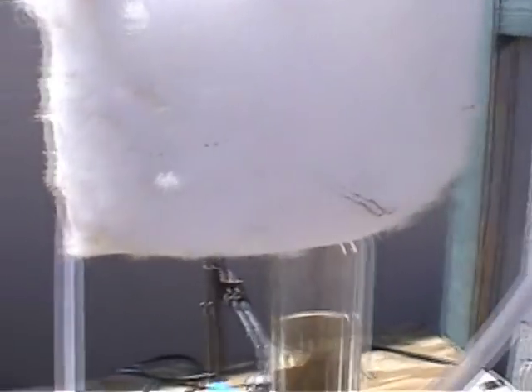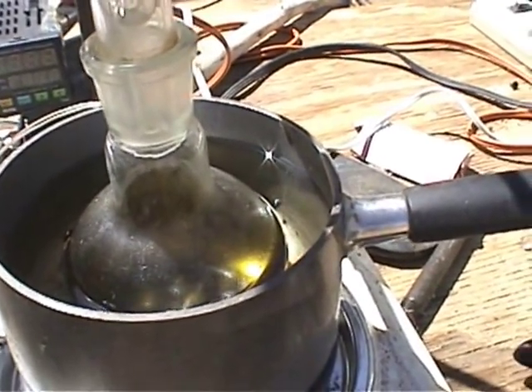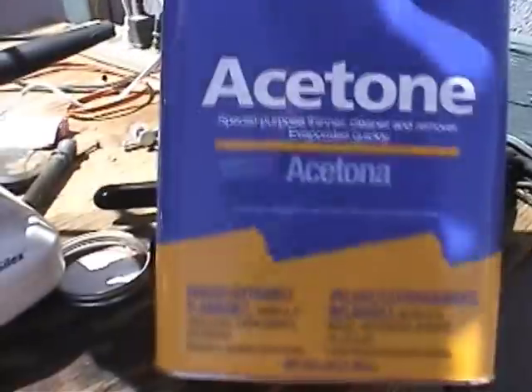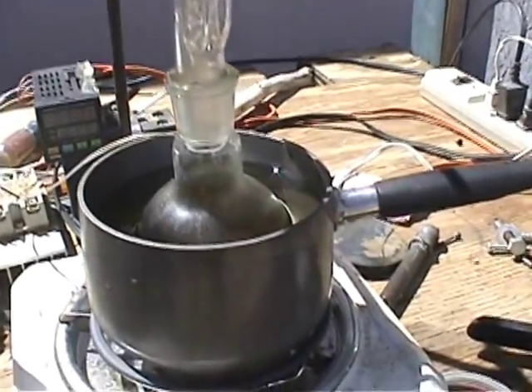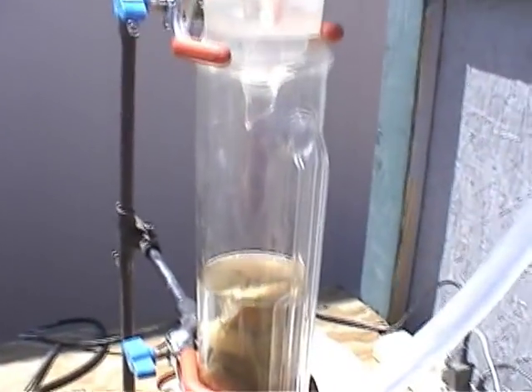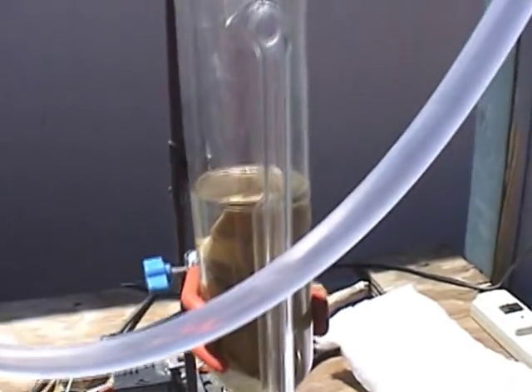I insulate the cold area. The tubing supply goes in the bottom, as many of you suggested — I wasn't thinking when I first set it up. I have an oil bath for my boiling flask; I use mineral oil because it's not as dirty as other oils and comes off fairly well with acetone. I'm using this acetone from the hardware store, and when I evaporate it I'm pretty sure everything is gone — I've got a pretty sensitive nose and I can't detect any acetone odor. It's very clean stuff. You can see the solution is clear, so everything is extracted out of it.